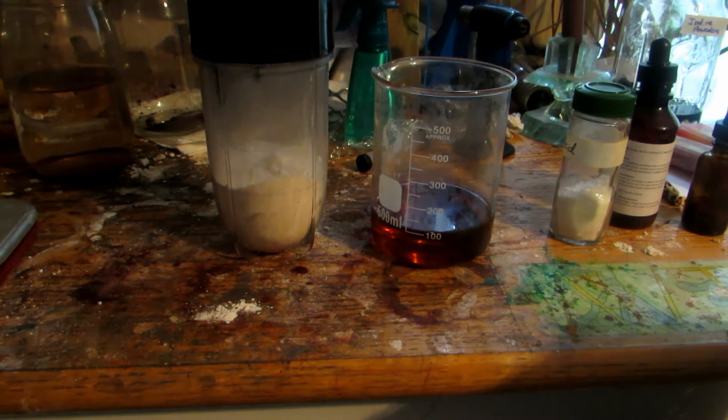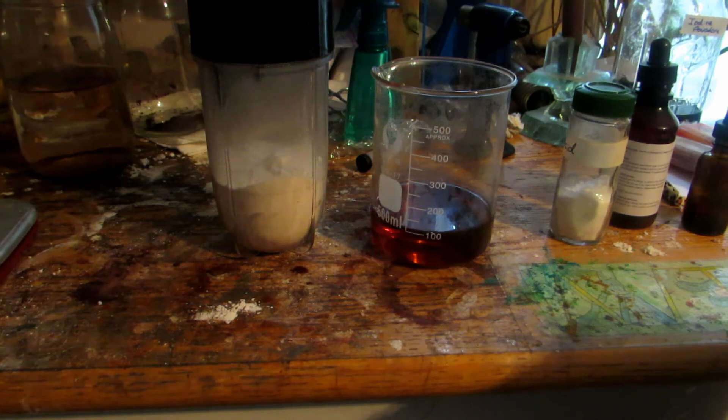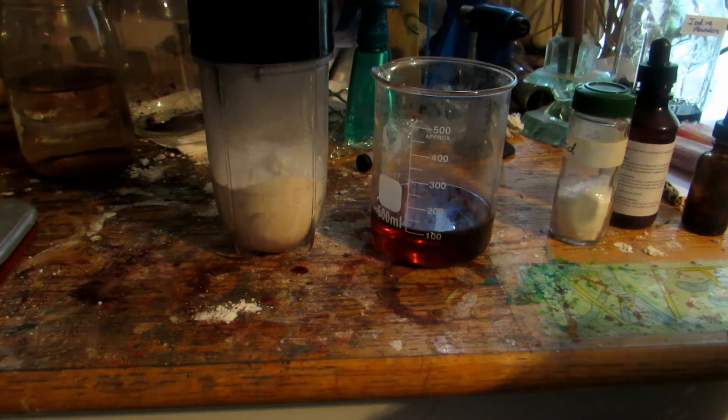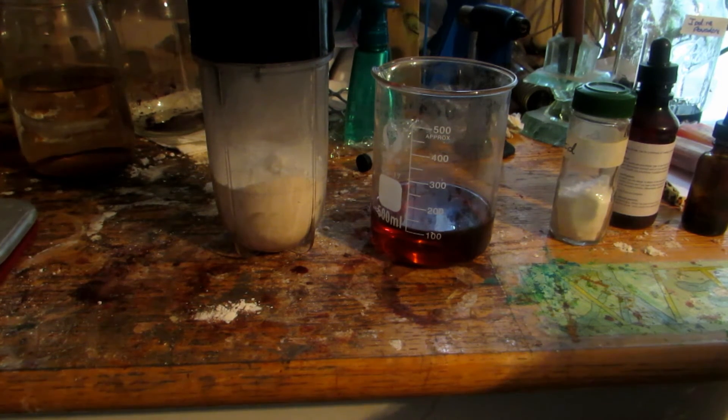It is important to dry your sodium nitrate if you are using that as much as possible, as it is hygroscopic and will absorb water out of the air. We want as dry a product as possible so that there's as little water in our final nitric acid as possible. So I'll set up my apparatus and I'll meet you outside.